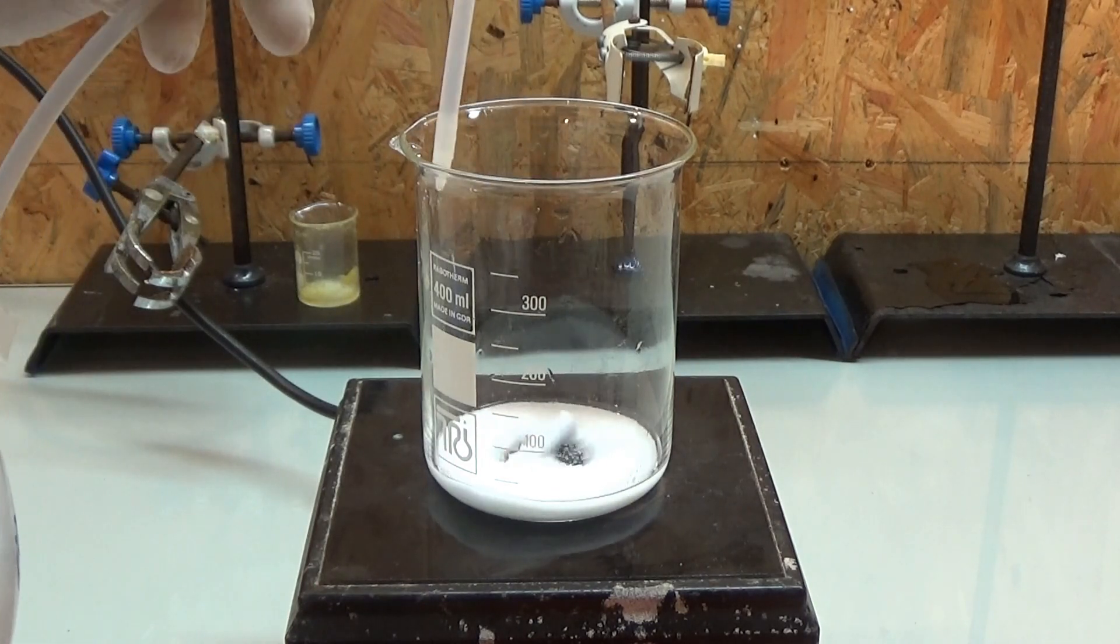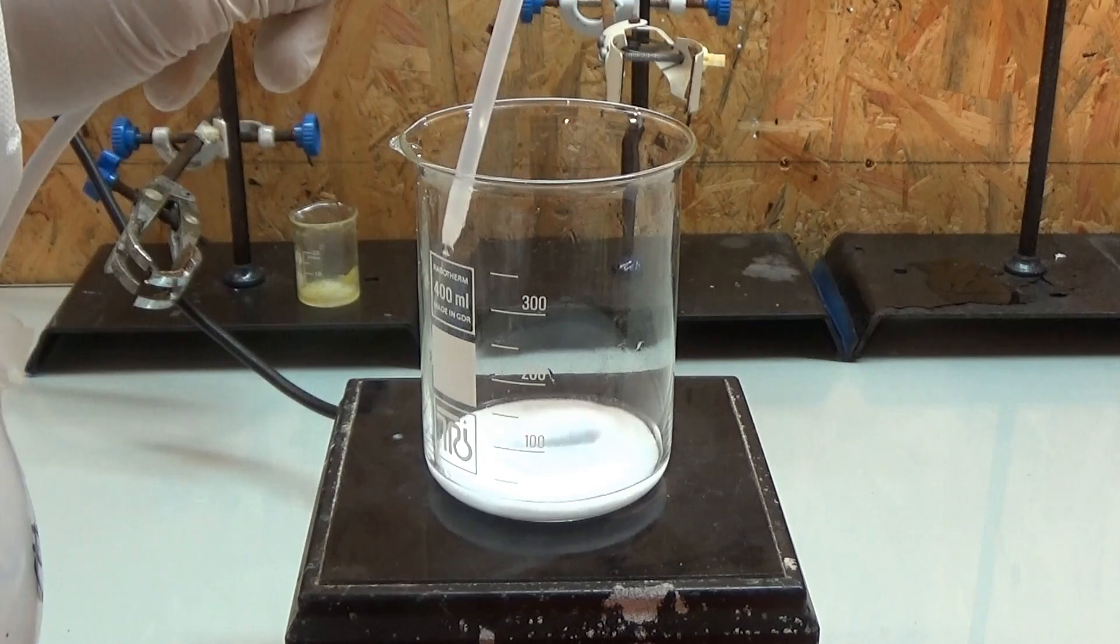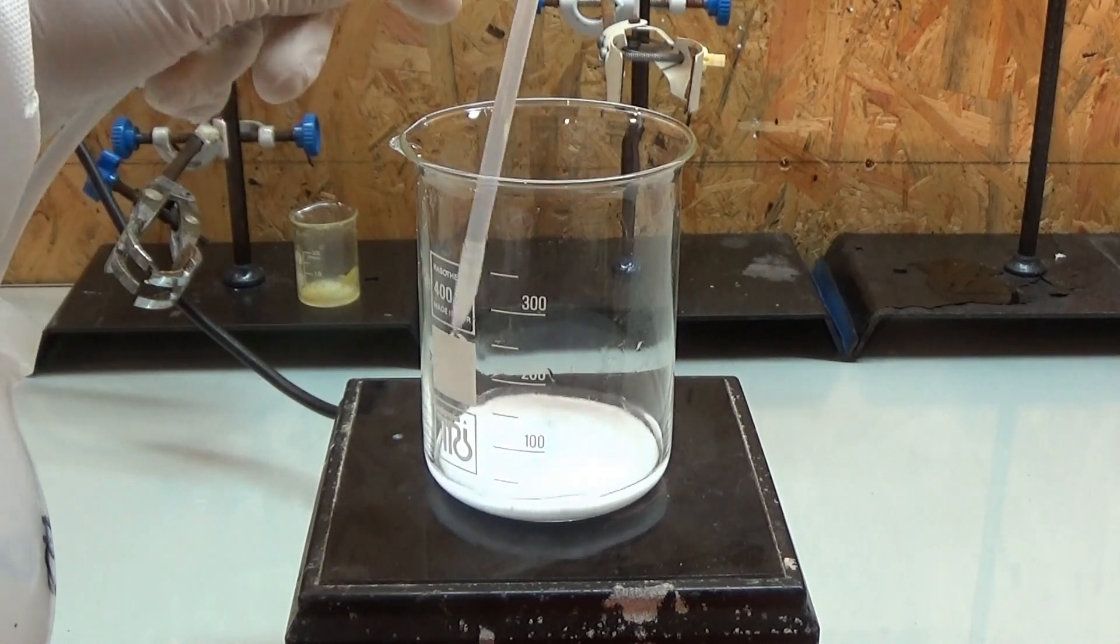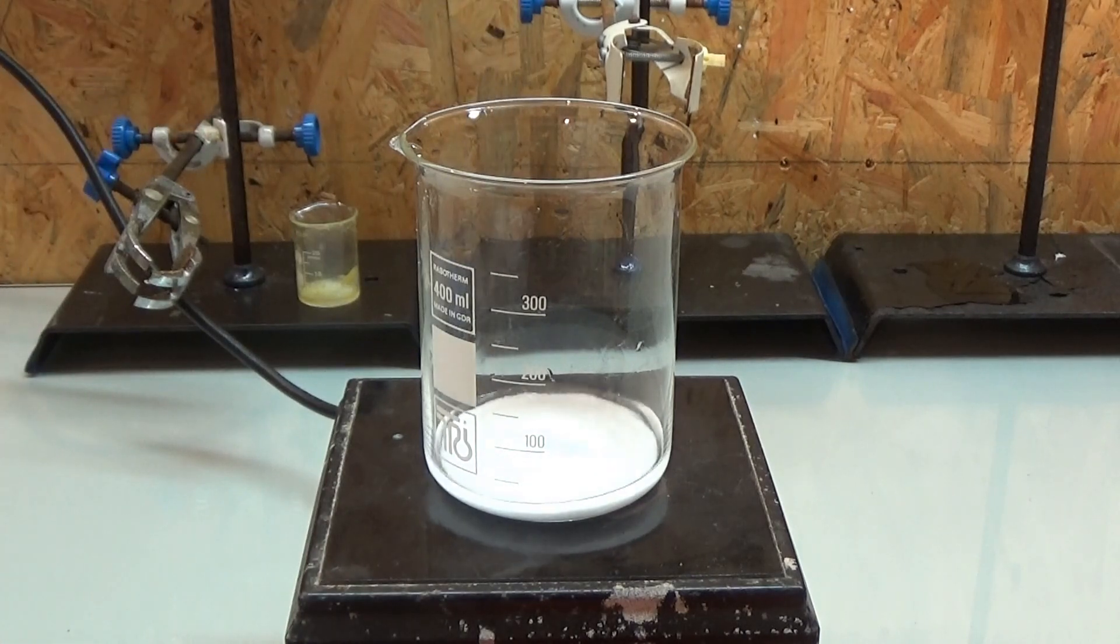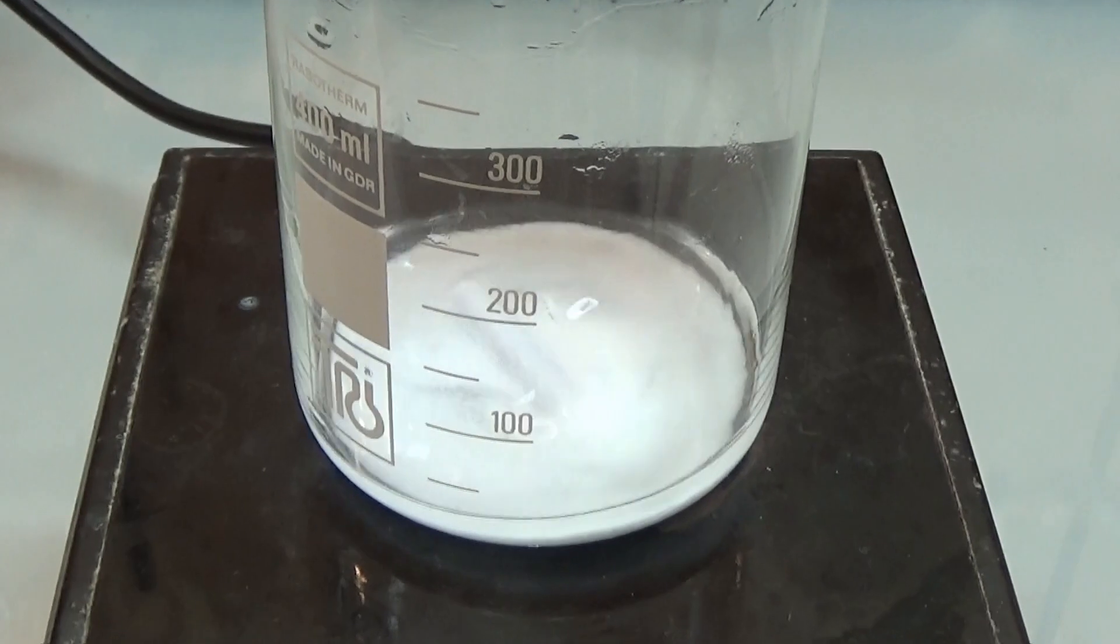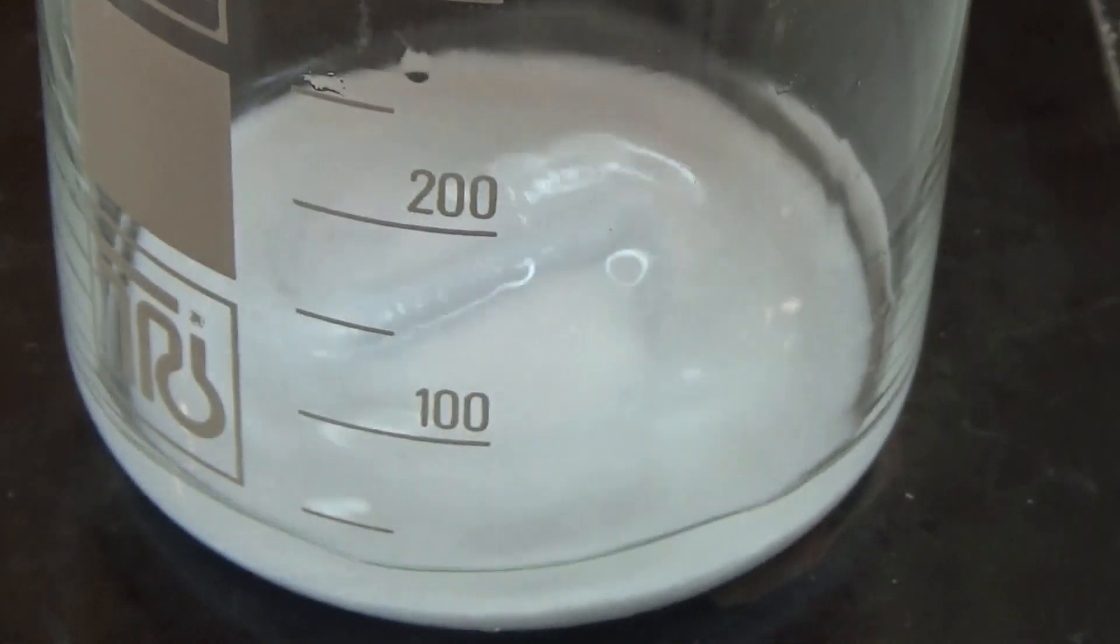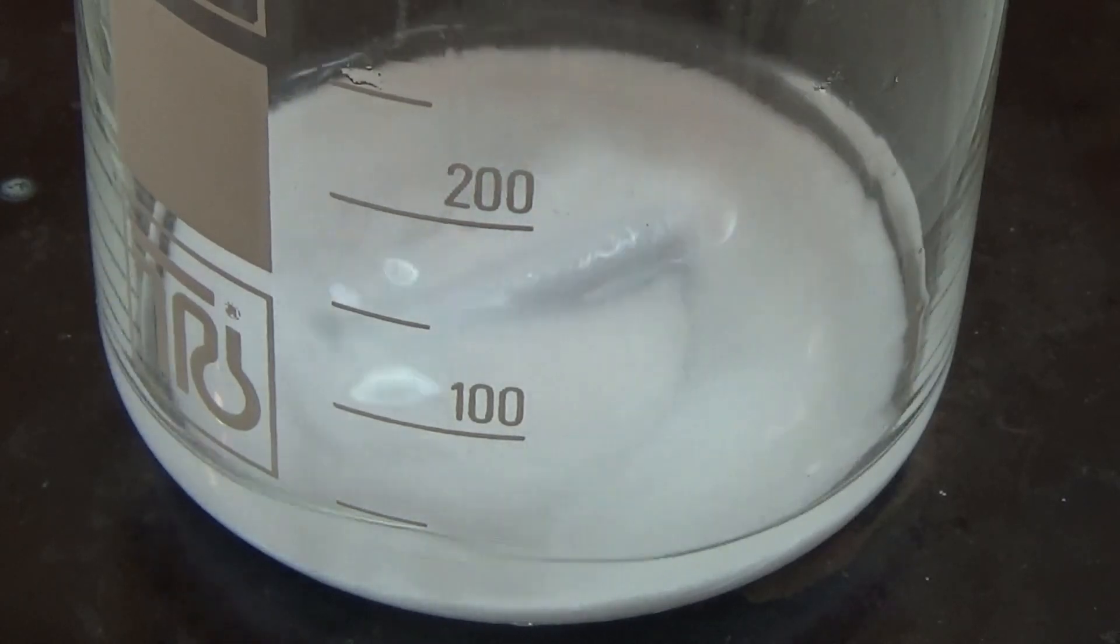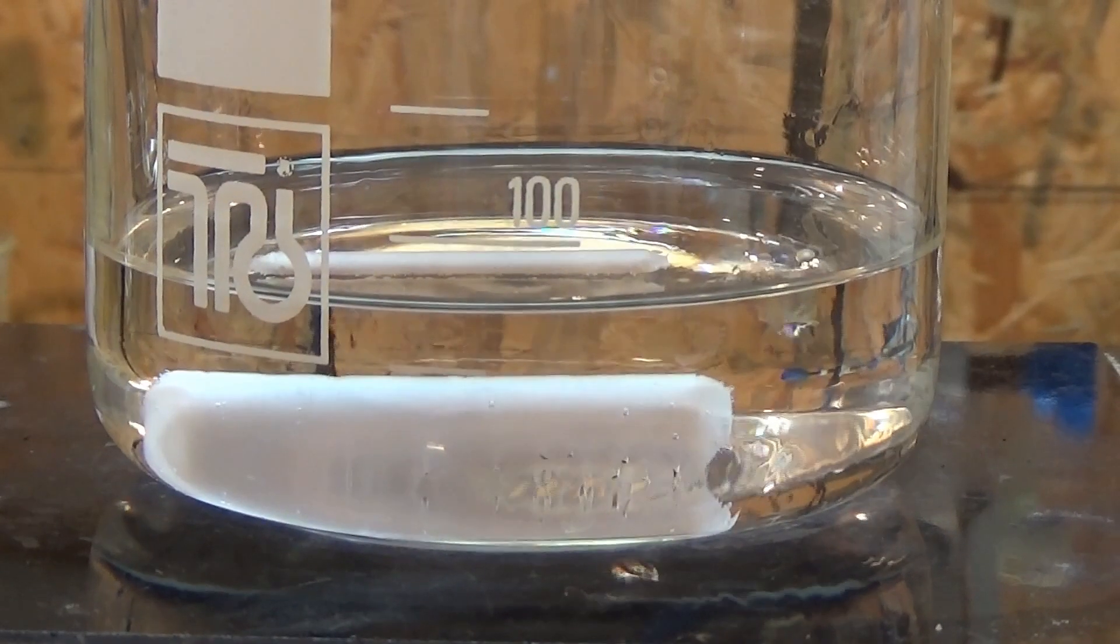The idea behind a recrystallization is that the different substances have different solubilities in the solvent of choice. Ideally the product you desire is highly soluble in the warm solvent and only slightly in the cold one. The side products are just more soluble anyway. Or should be. So that's the theory, let us see if I am correct or if the manufacturers used some nasty stabilizer to ruin my day.